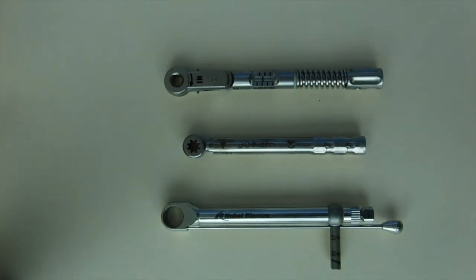This presentation will be a demonstration of three of the more commonly found torque wrenches in dentistry today.